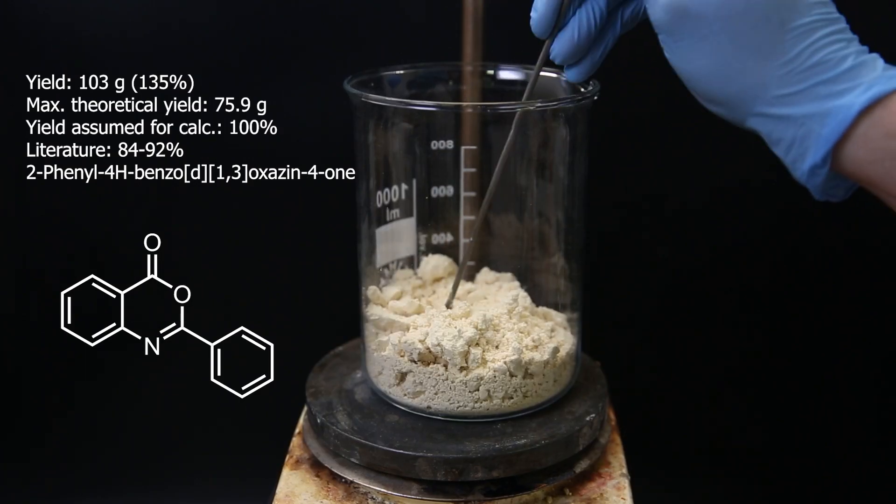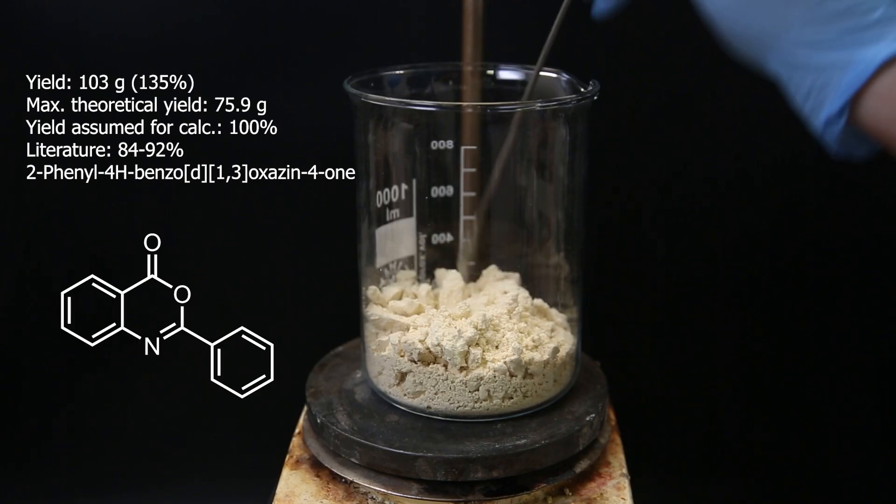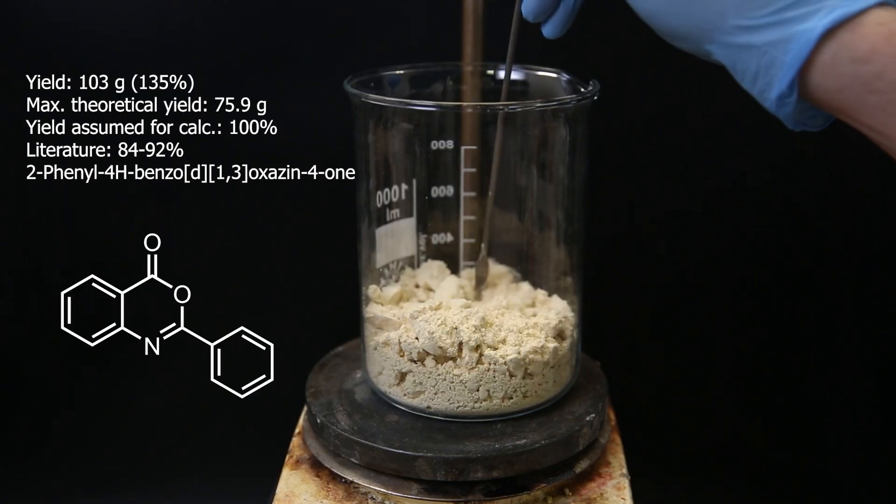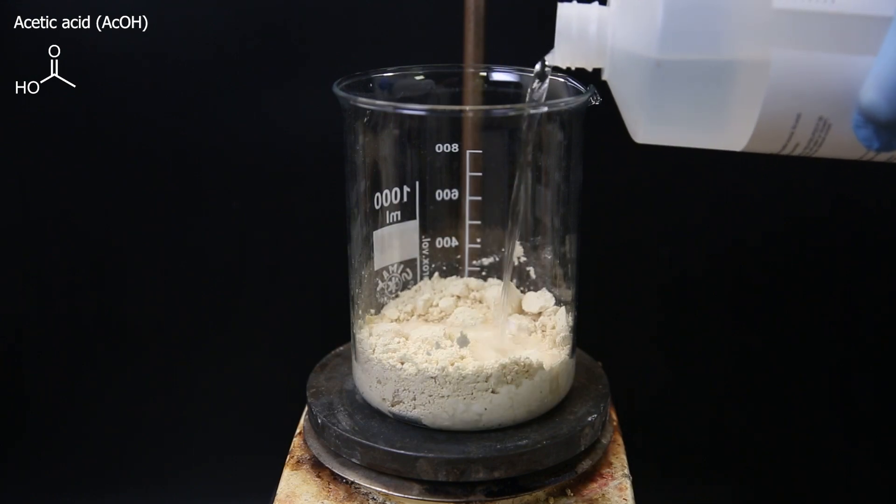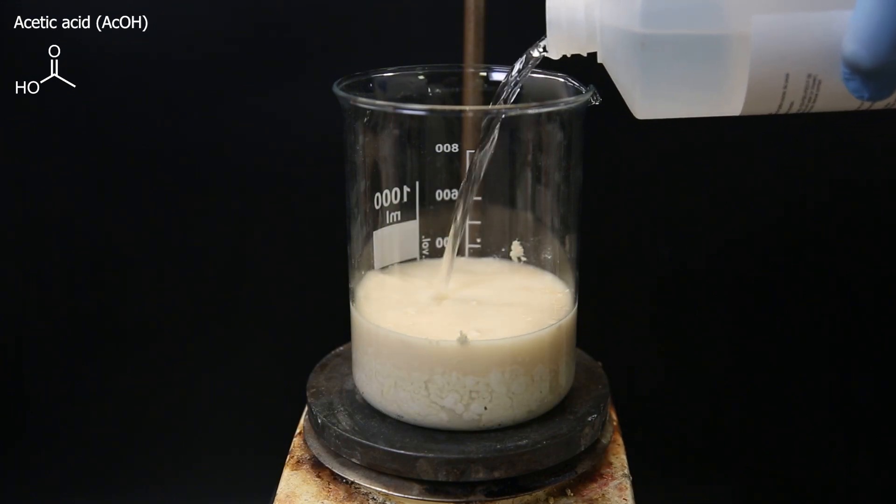Either way, I can forward it to the next reaction without issue, and I assume the yield is 100% for the calculations. So, for the next reaction, I largely dissolve the material in about 600ml of acetic acid.